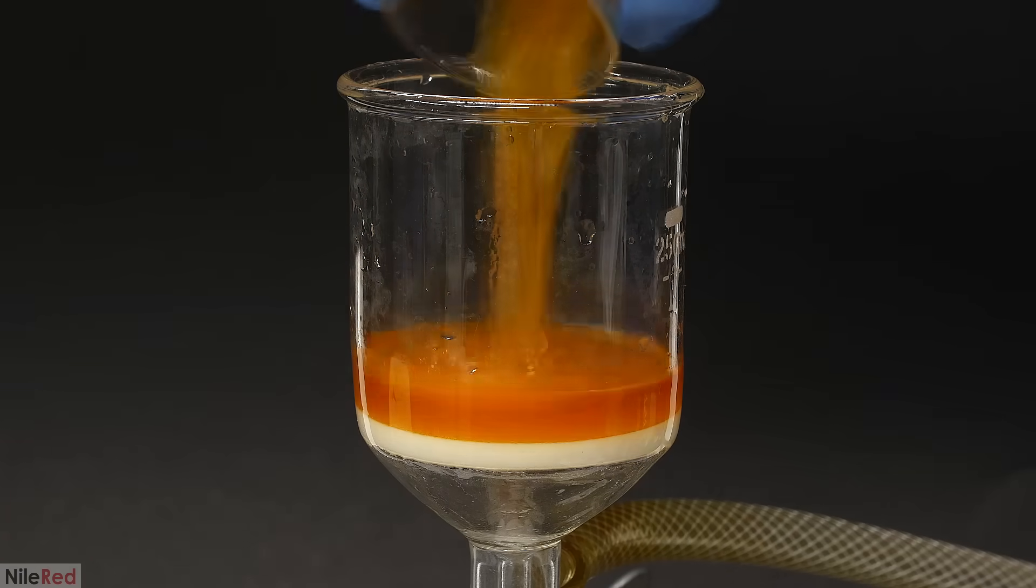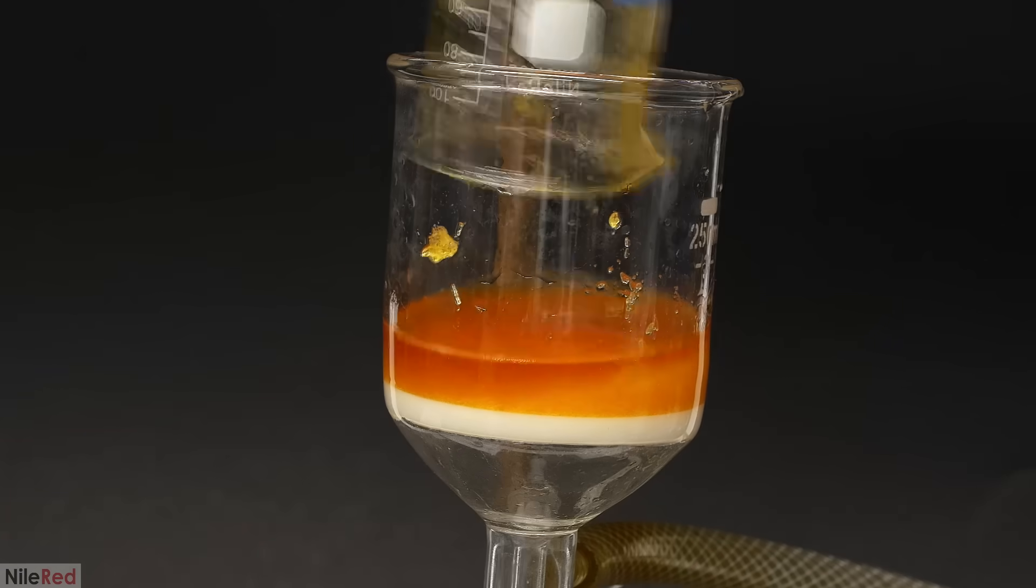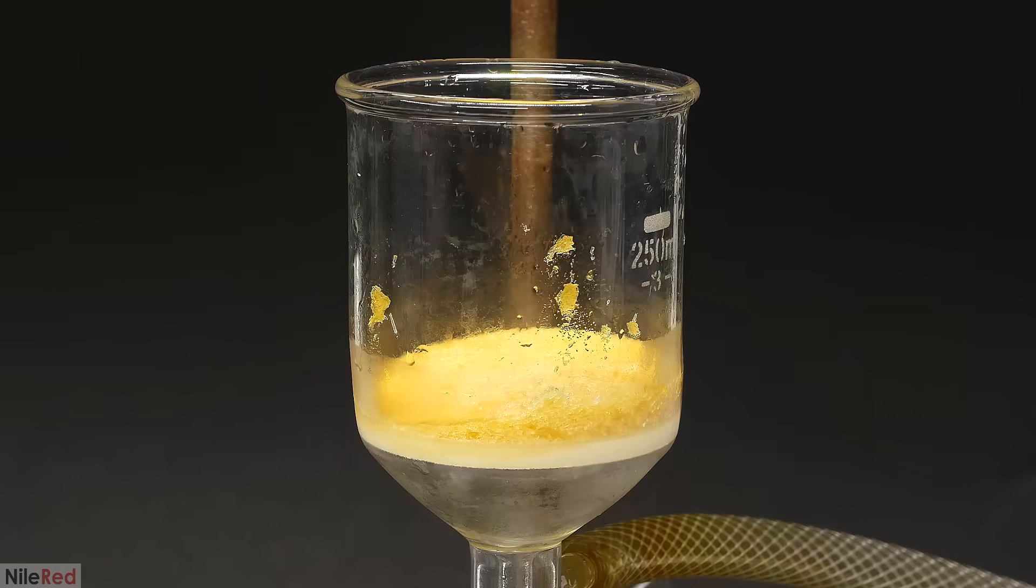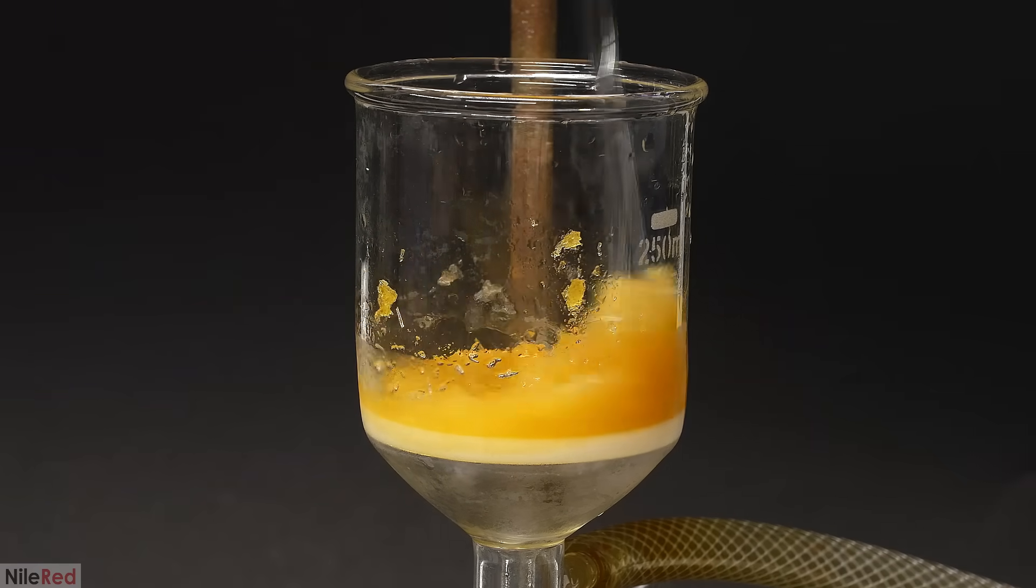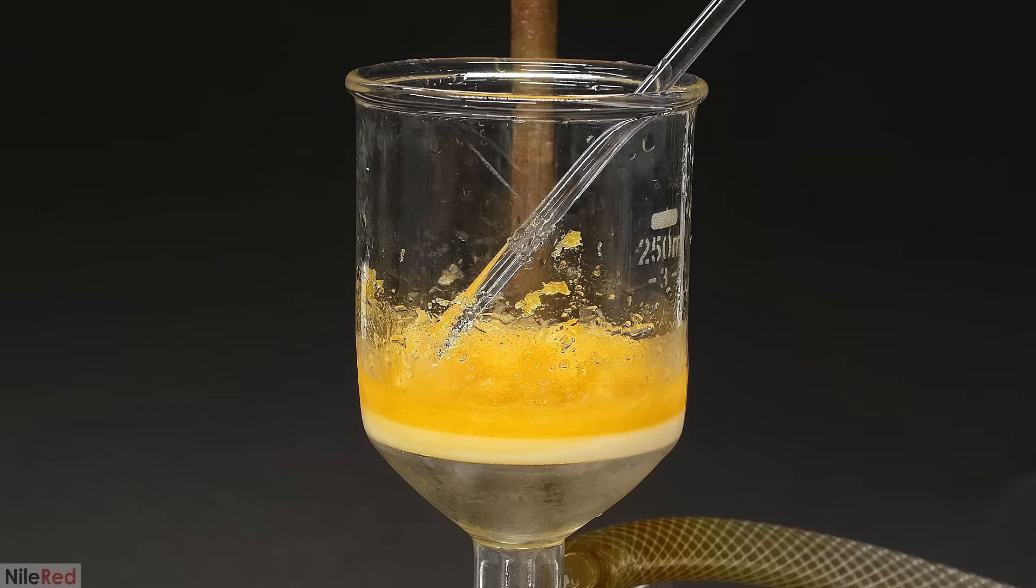Then, just like we've seen before, I break everything up and filter it off. After everything is pulled through, I wash it a couple times with some ice-cold ethanol to try to get rid of the color.